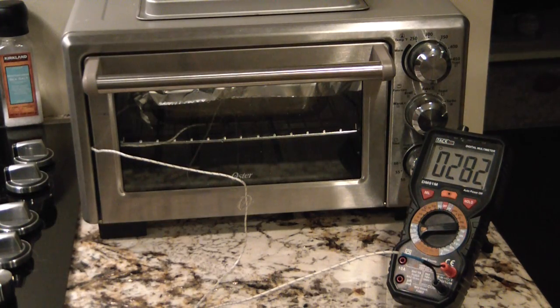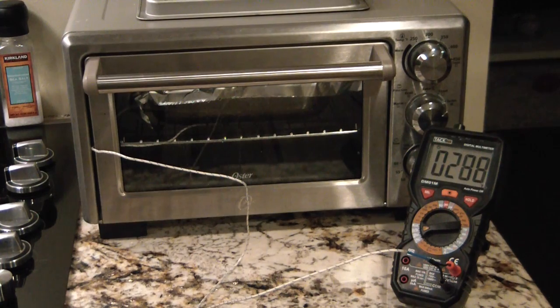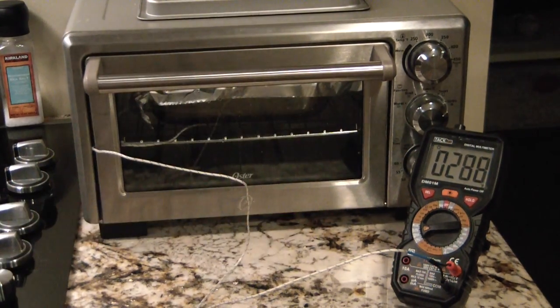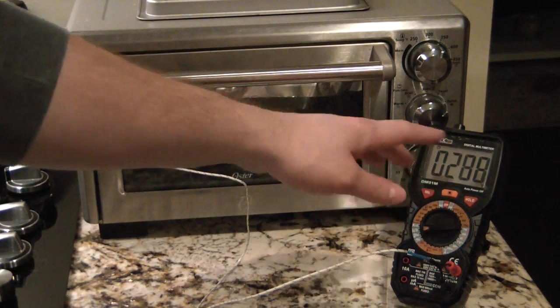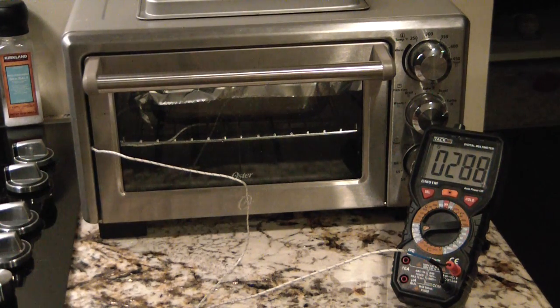Don't tell my wife and don't repeat this, but I don't have an oven in the lab, so I had to resort to using the toaster oven. I covered the top up so no crystals pop out or contaminate anything. Yeah, shouldn't be a problem. Oh also a note, look at how off the oven is from the actual temperature. I got this thing set to about 350 and it's hovering between 275 to 290. So that shows you how well Oster calibrates their equipment.